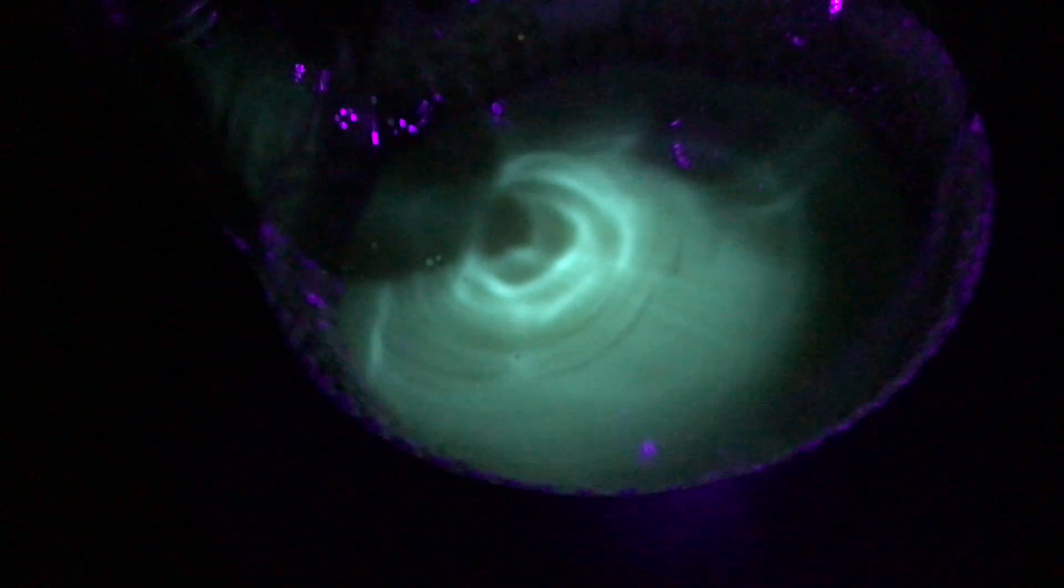While fooling around with a UV light for a different upcoming project I noticed that the extracted liquid and the seeds glowed under ultraviolet light. As tropane alkaloids are not fluorescent, the fluorescence seems to come from some other unknown contaminant in the seeds. It surely looked beautiful though.